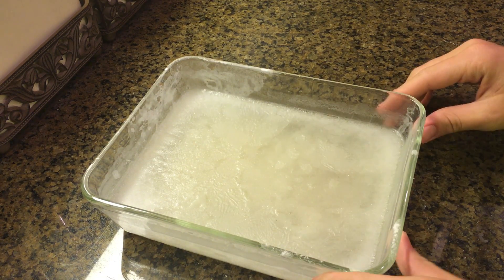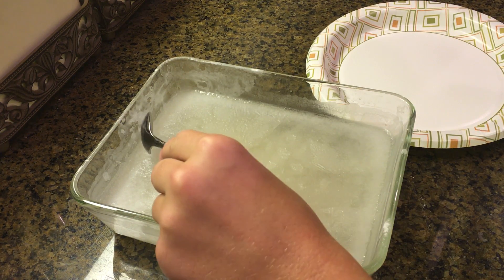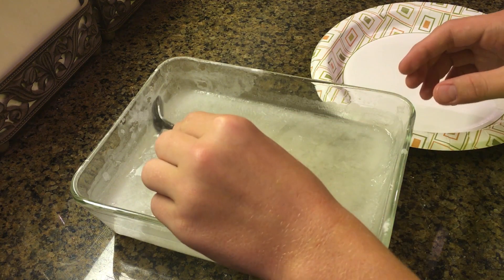Alright, so it's been a while. I actually pulled this off just to crystallize it faster. There's another top layer of potassium nitrate, and then under it there's just crystals all over it. So I'm just going to scrape this top layer off — I don't really need that. What I really want is the crystals.